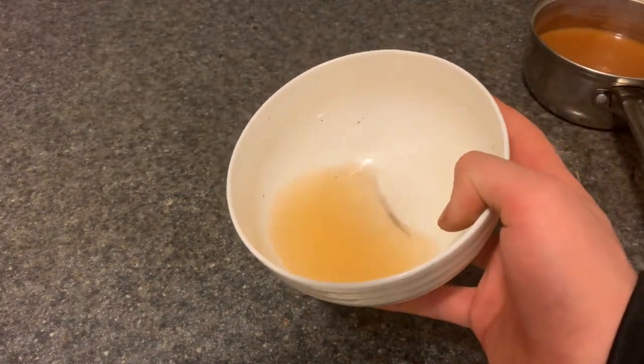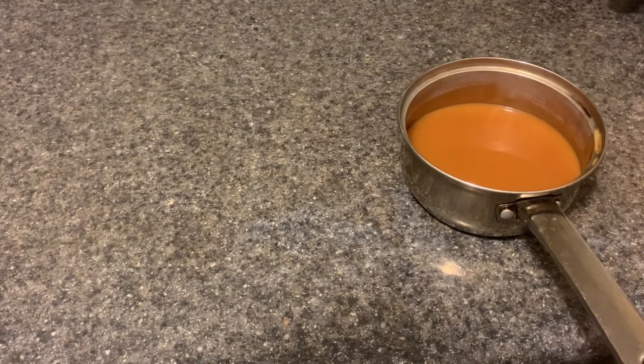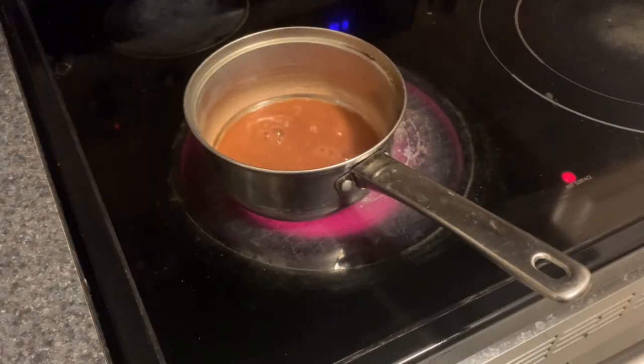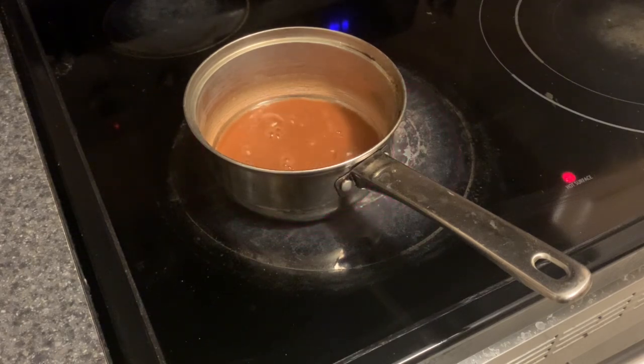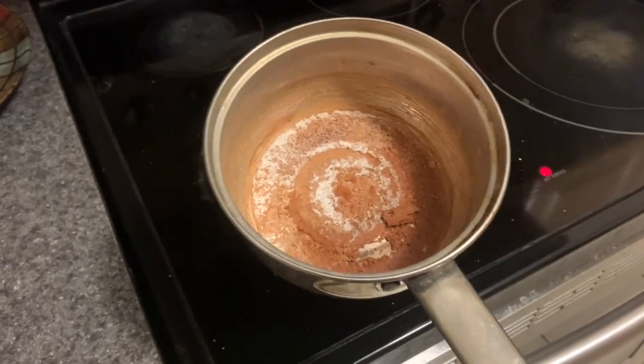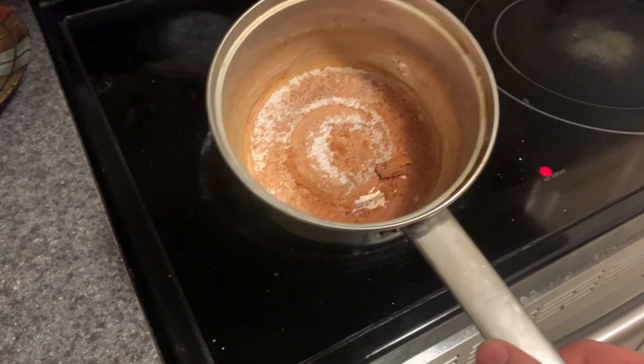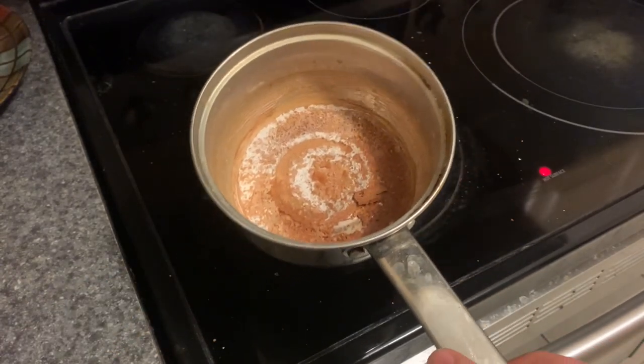For example, if it were a bit less concentrated, it would be this color. This is exactly the type of substance which is on my profile picture right now. I'll just pour this into the pan and get to boiling. Now, since this thing is nearly done boiling, I need to remind you that in the solution there were actually two main types of molecules: iron-oxides and iron-hydroxides. By boiling this, I will be getting iron-hydroxides and iron-oxides mixed together. I left this thing run until all of the water managed to boil off, and I got this small amount of iron-3-oxide and a little bit of salt, which I used as the electrolyte.